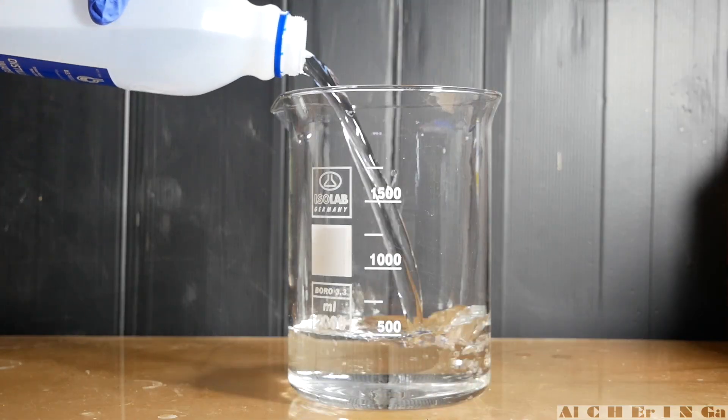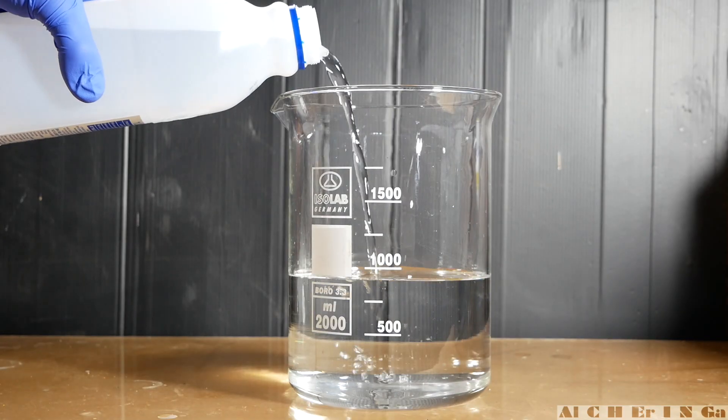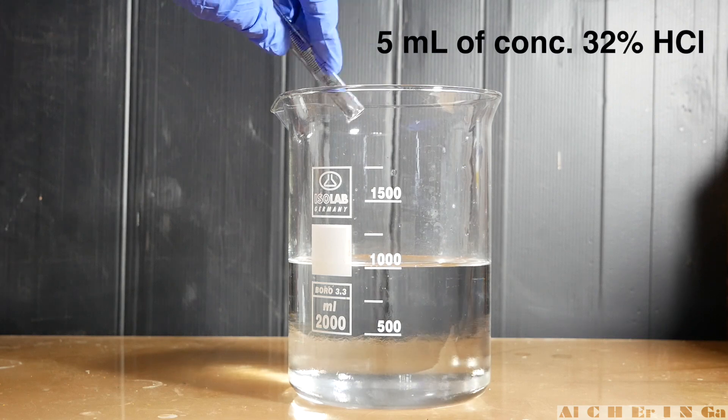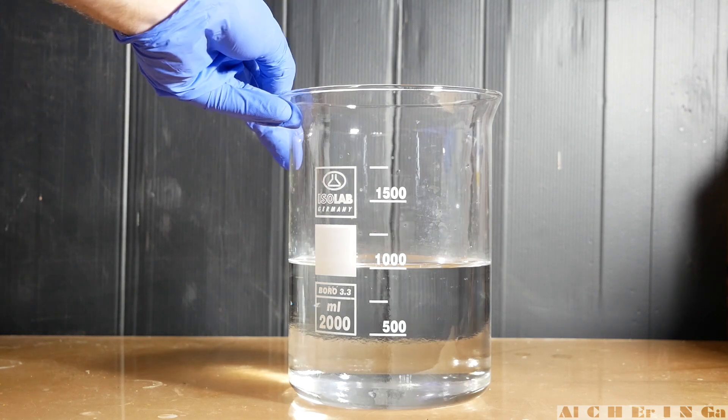Okay now, get a beaker and pour in 1 liter of distilled water. To it, add 5 milliliters of concentrated 32% hydrochloric acid, swirl the solution.